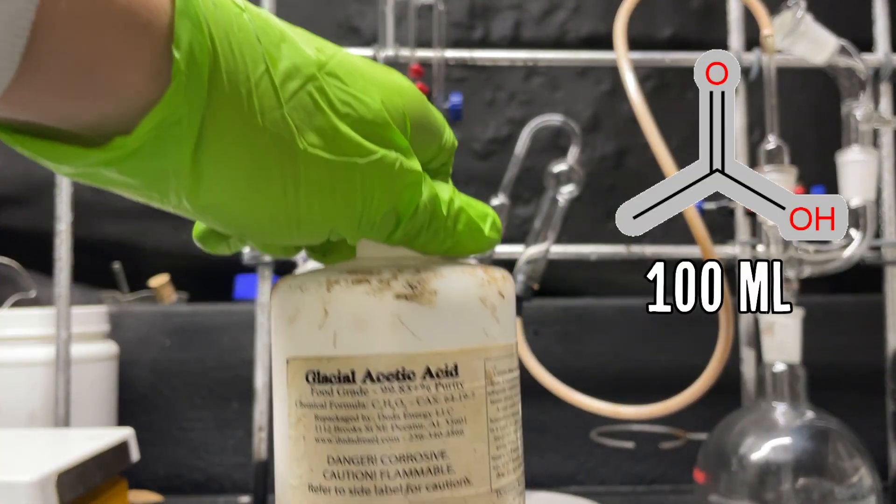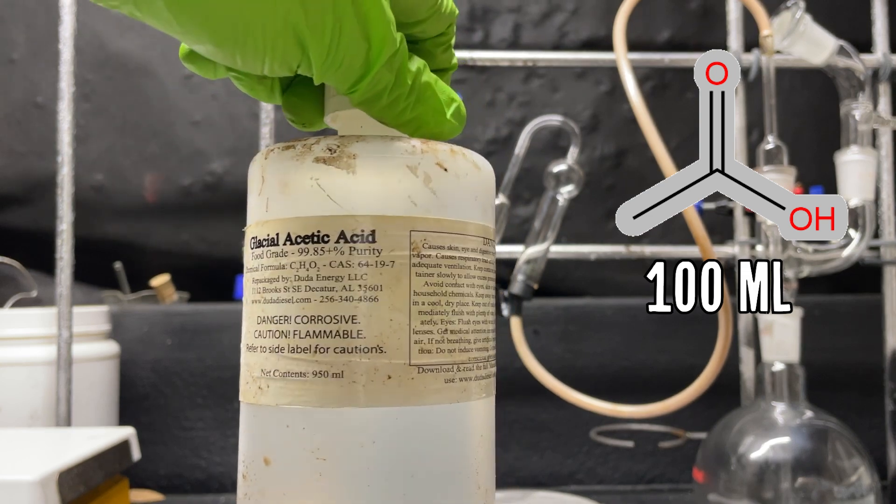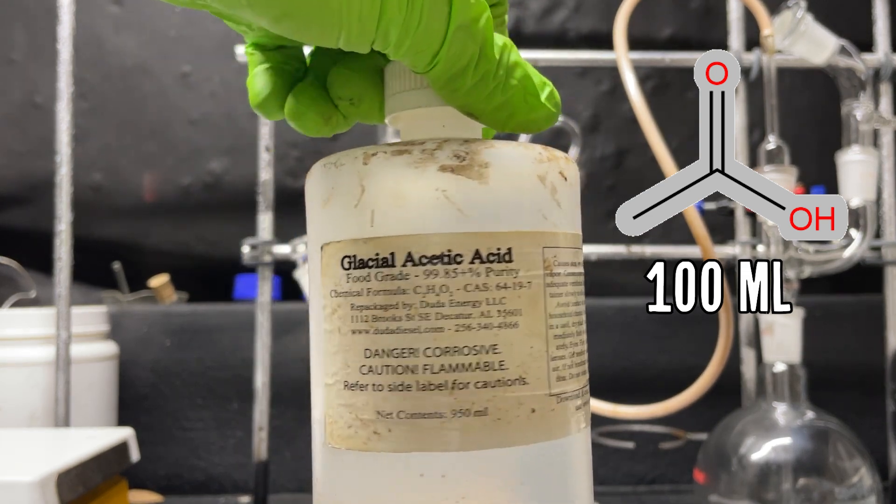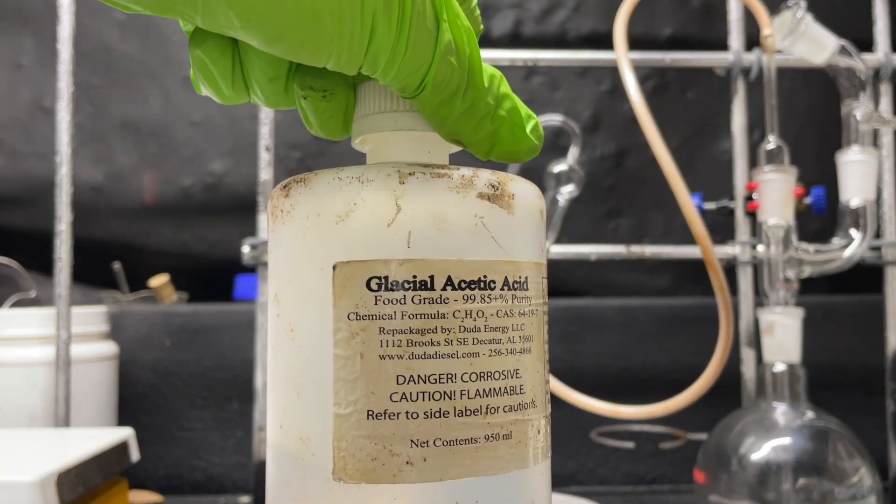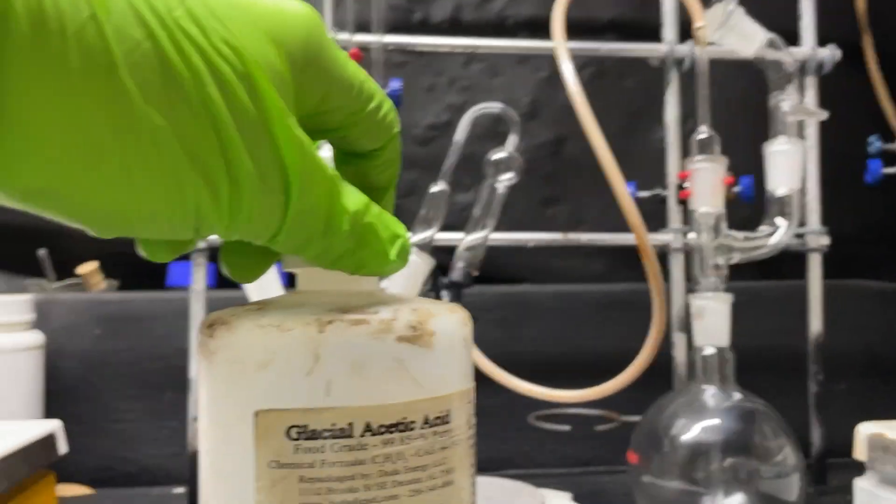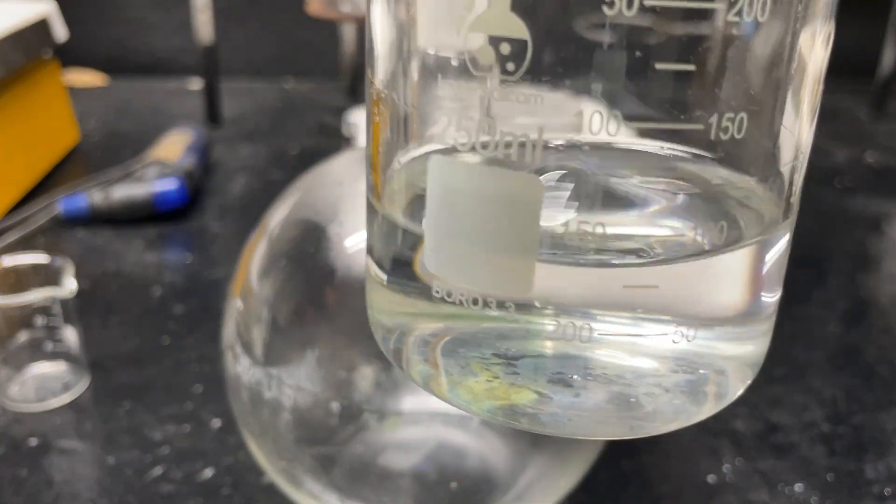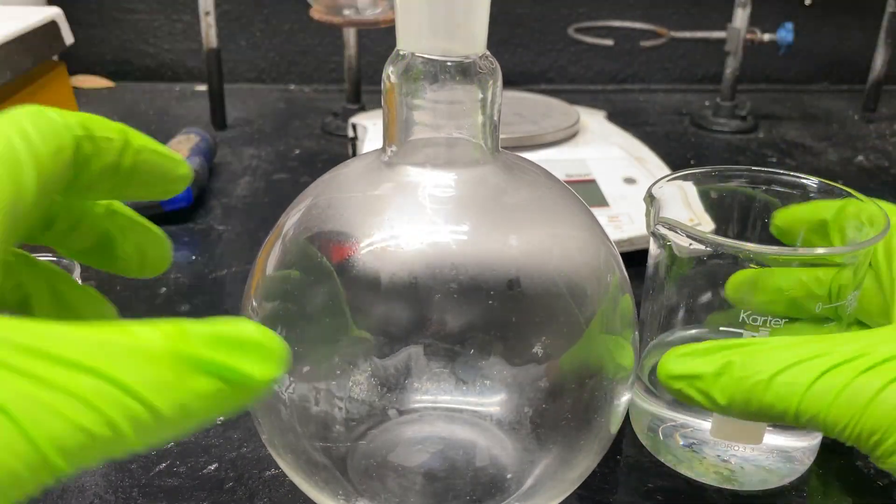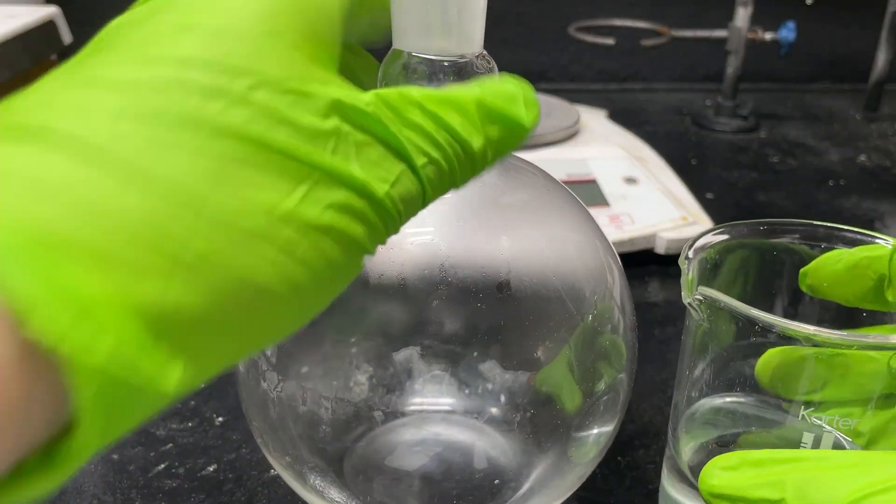To make our mace we're first going to need glacial acetic acid, which is pure acetic acid. Yeah don't sniff this stuff, it will burn. I've learned the hard way. Some British person's gonna go wild over this - pure vinegar, holy crap.